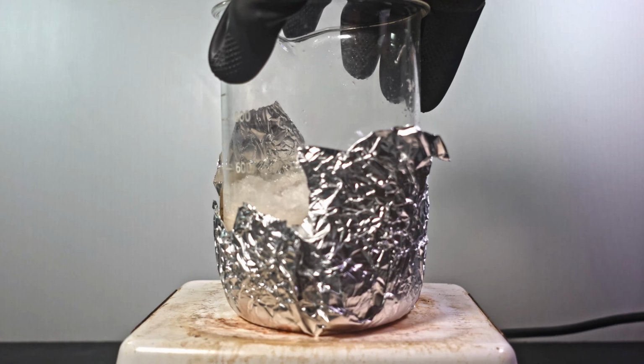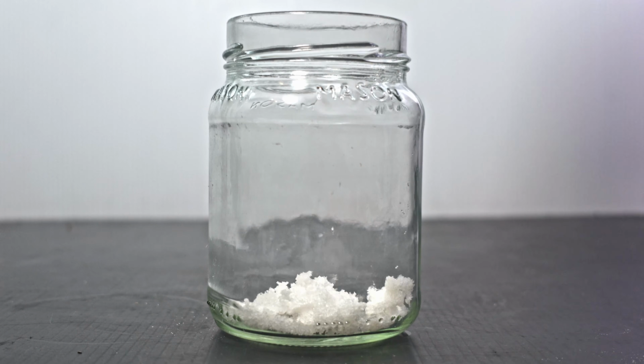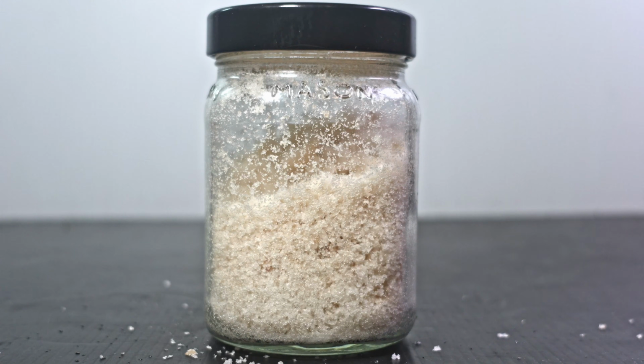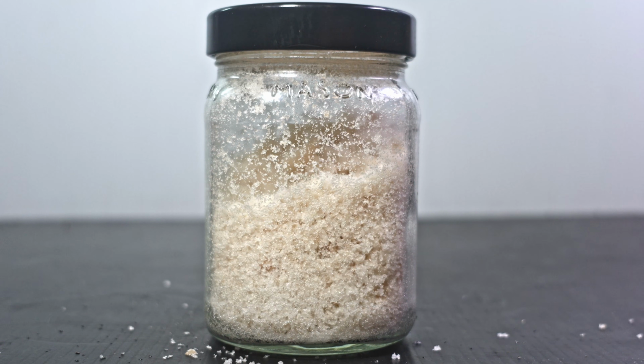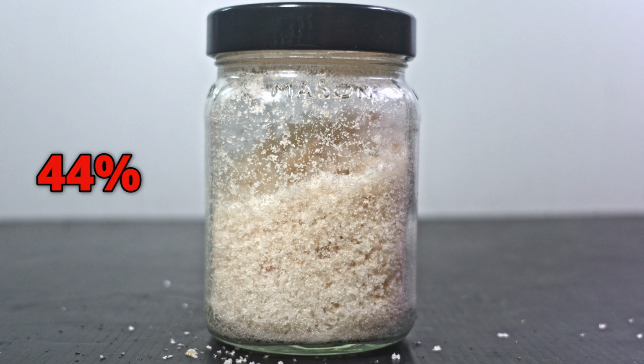I warmed the crystals for a while just to boil off any methanol still clinging. Then I begin the arduous process of scooping it into a storage jar. When I finish, I find out I collected only 145 grams of hydroxylamine chloride. You may think this is good, but considering the ideal yield is 330 grams, you can bet I wasn't going to take a 44% yield after all that work.